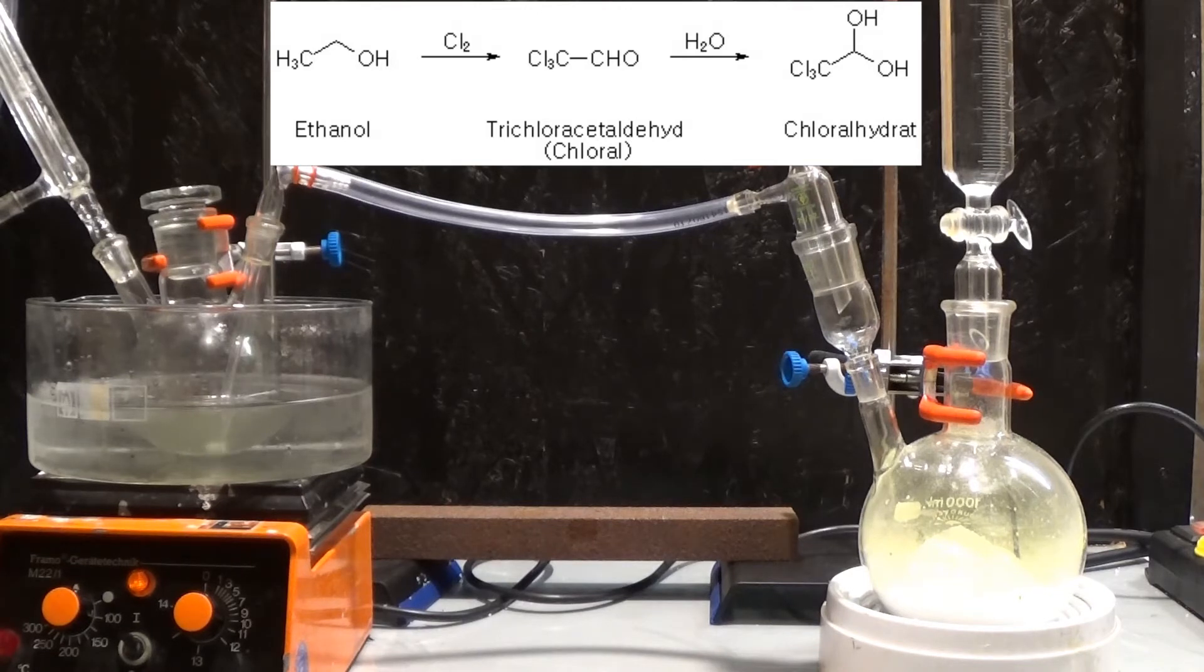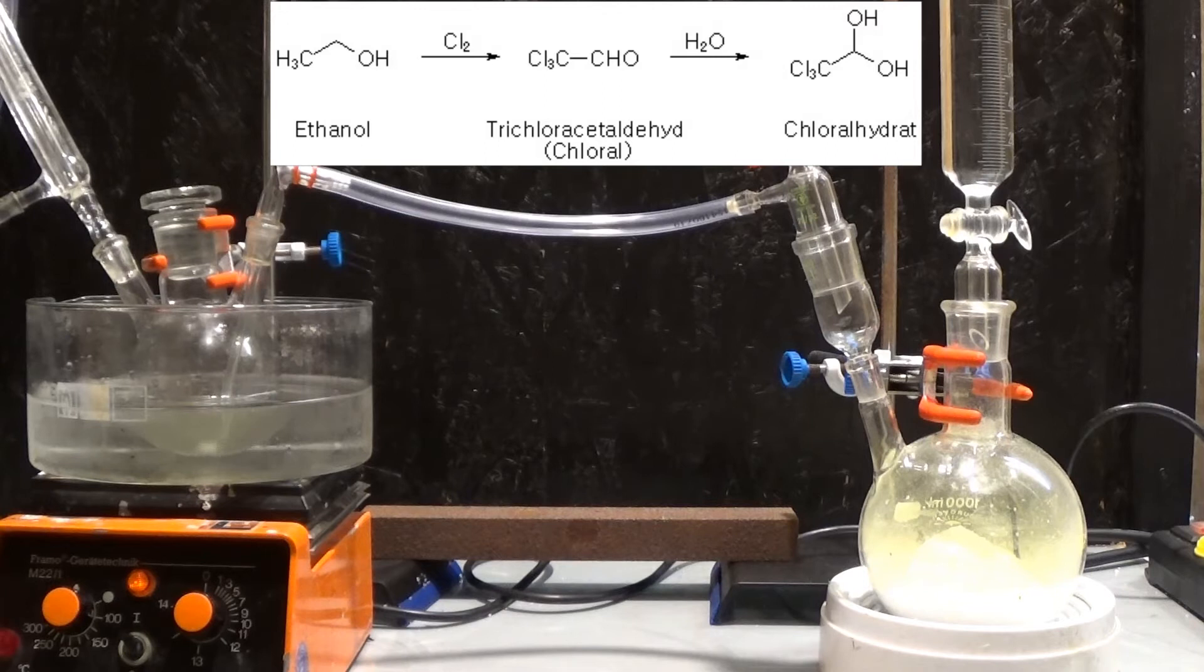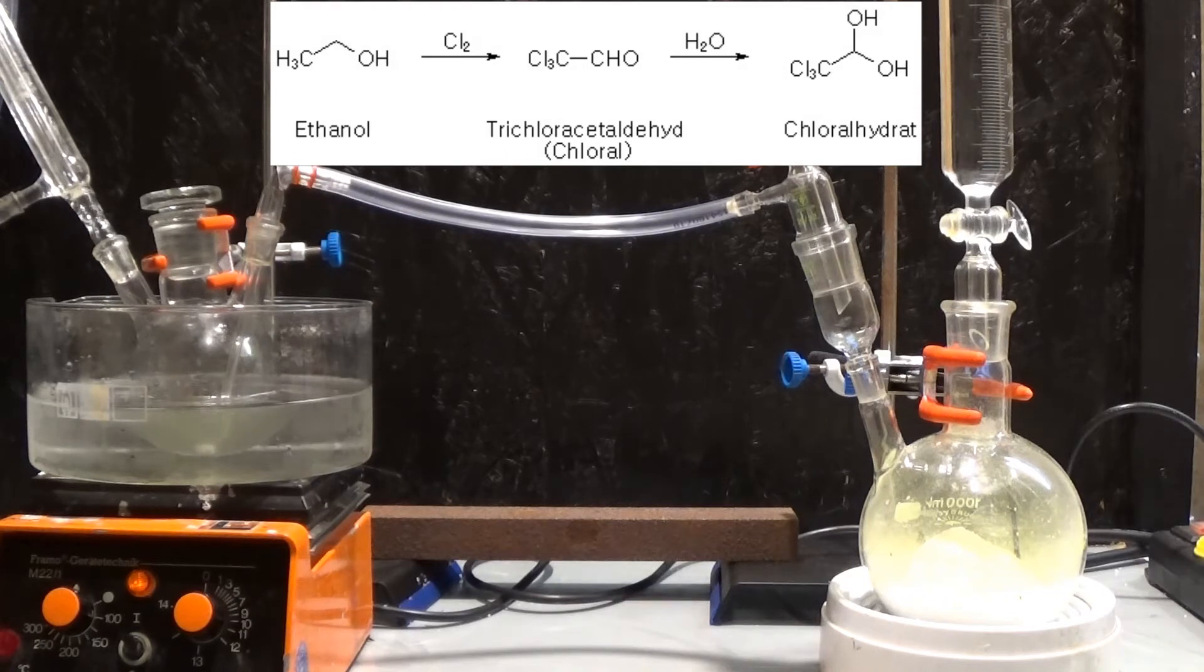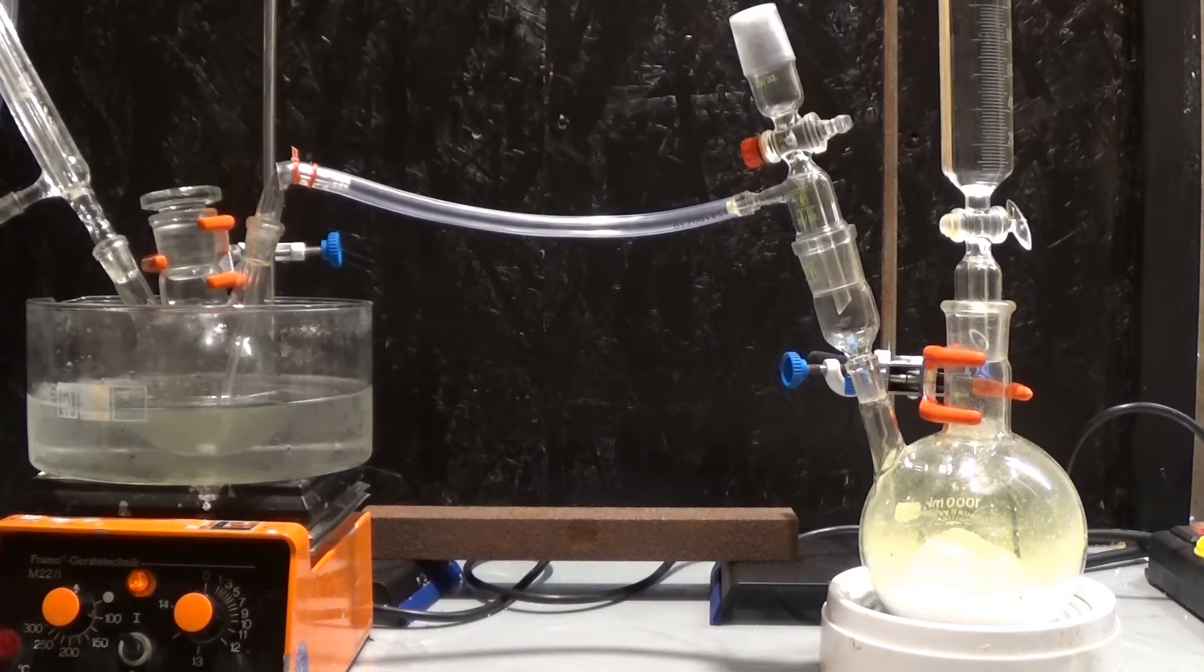With each chlorination a molecule of hydrogen chloride forms. Now the problem is that the secondary step where the trichlorinated aldehyde is formed is not explained anywhere, or at least I did not find it. I can just assume that it may be some kind of intramolecular rearrangement.